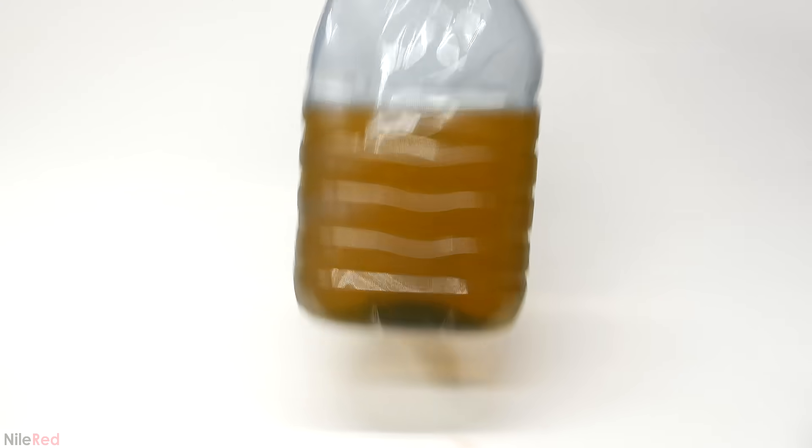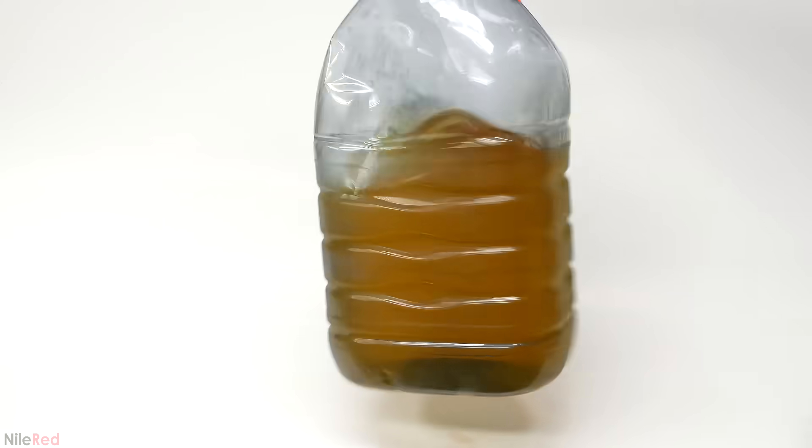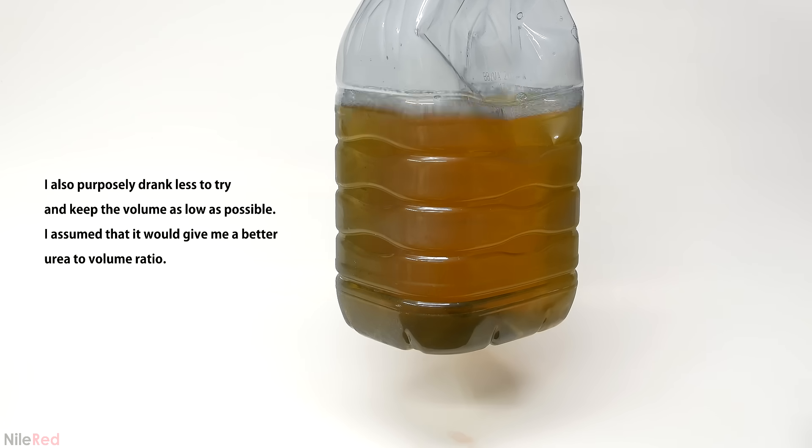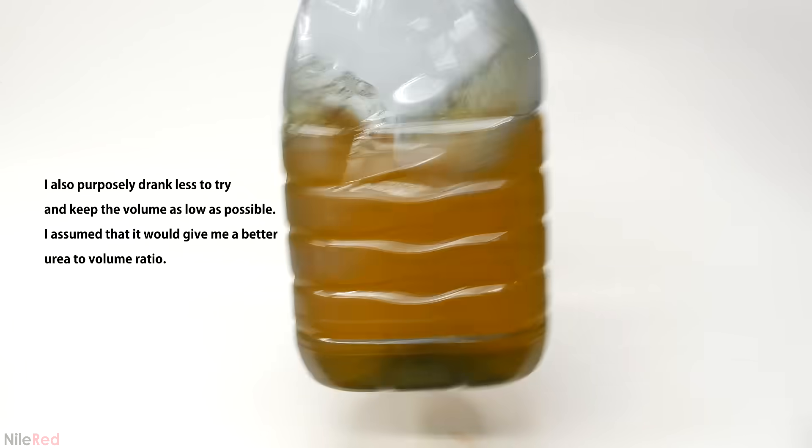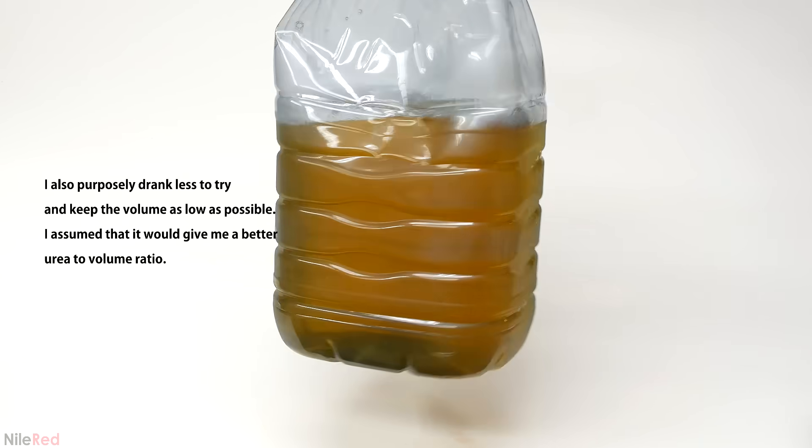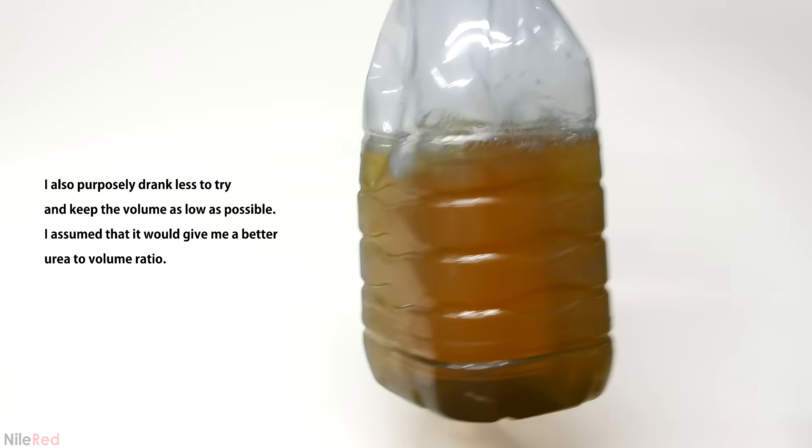Anyway, to get the project going, I had to start saving all my pee in a container, which was not super enjoyable. It took about three days to collect a little over three liters of the nice golden liquid.